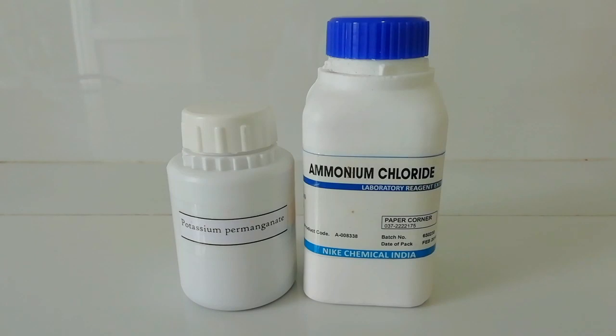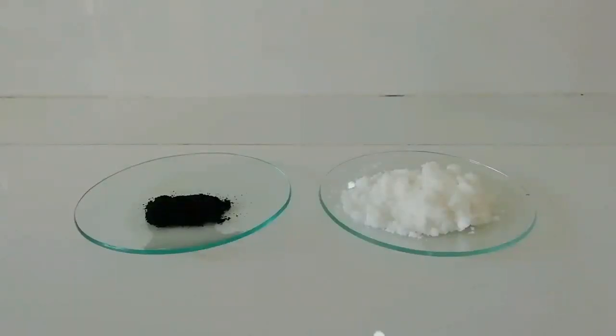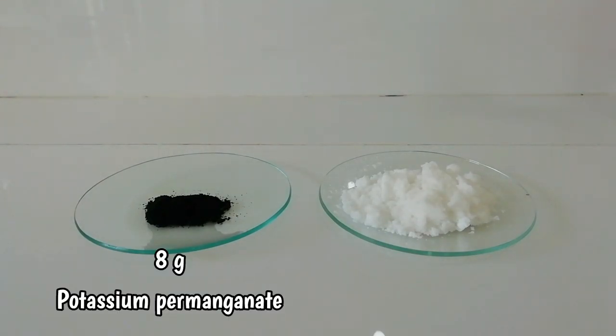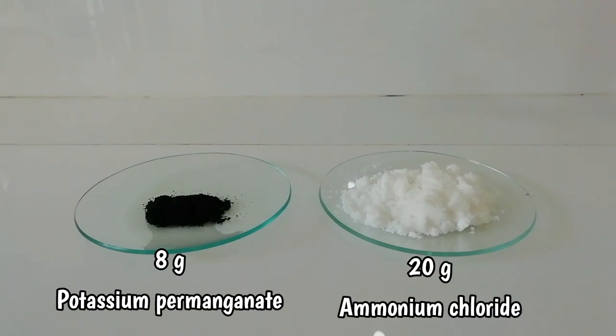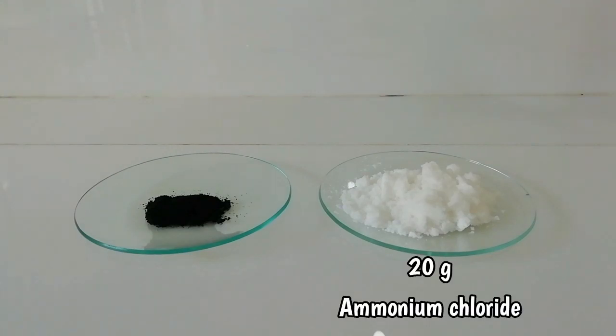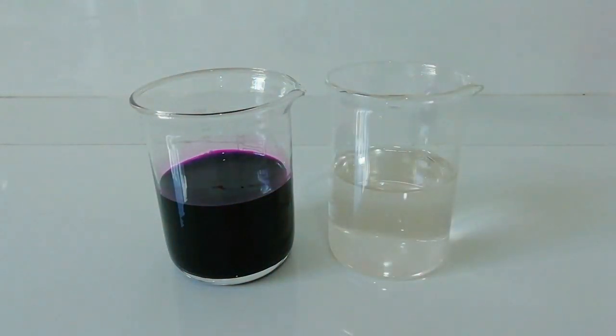For this experiment we need two chemicals: potassium permanganate and ammonium chloride. Here I have taken about 8 grams of potassium permanganate and 20 grams of ammonium chloride.